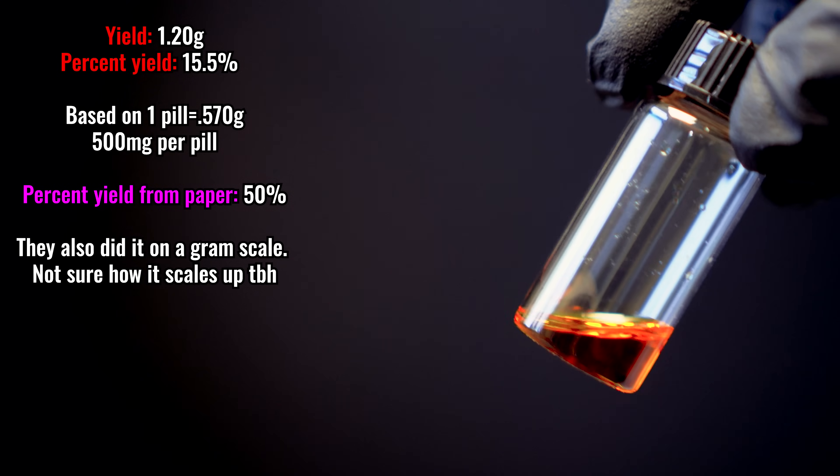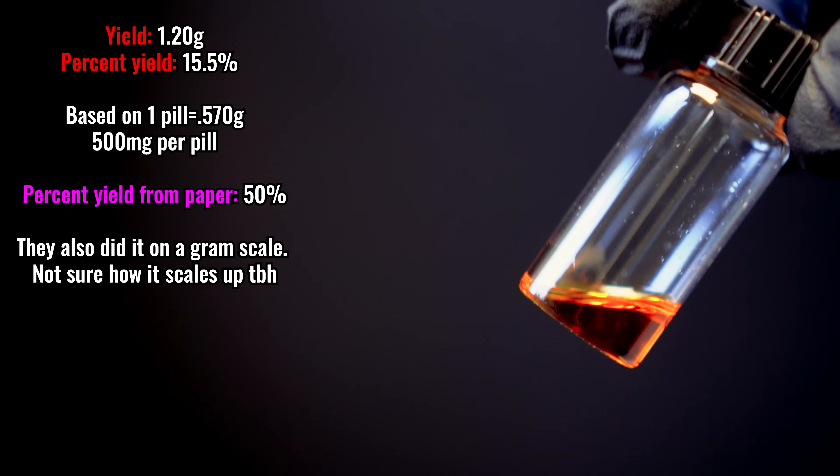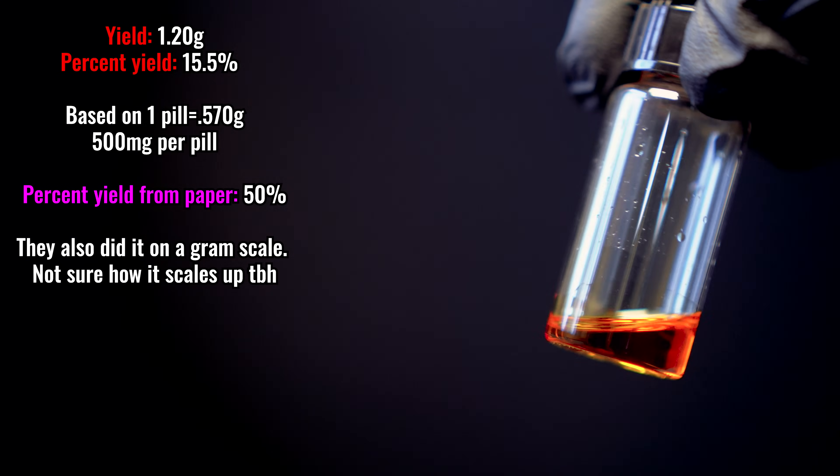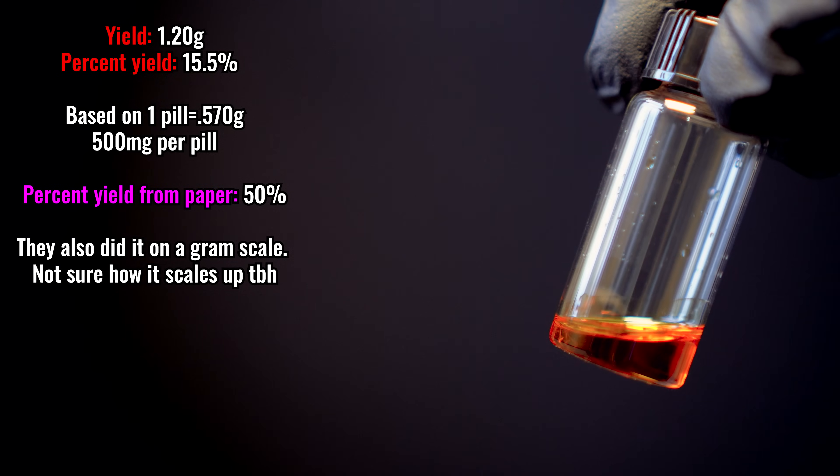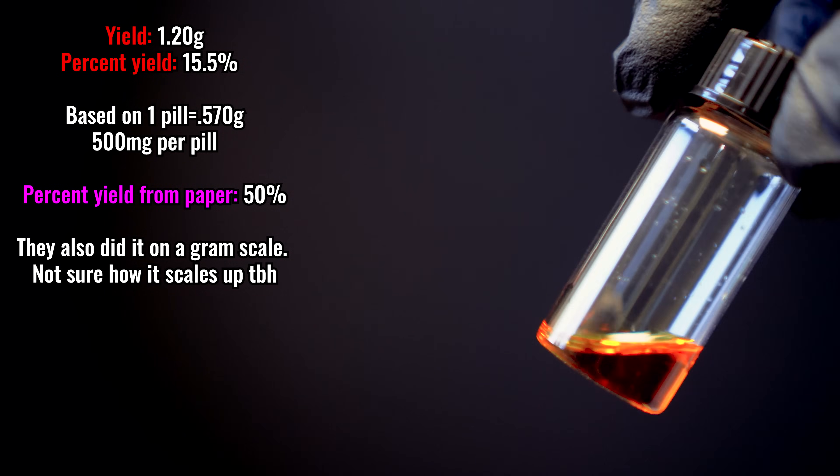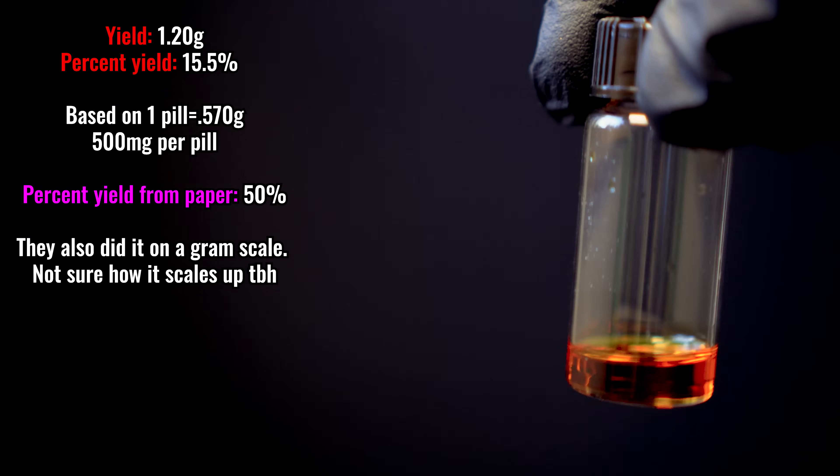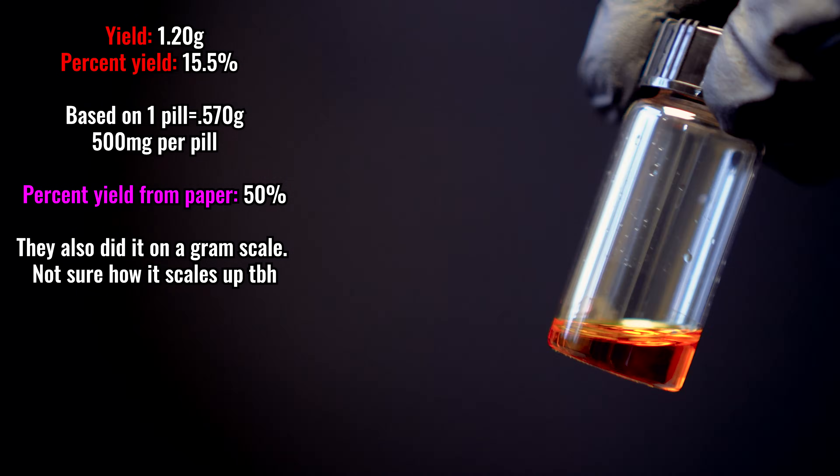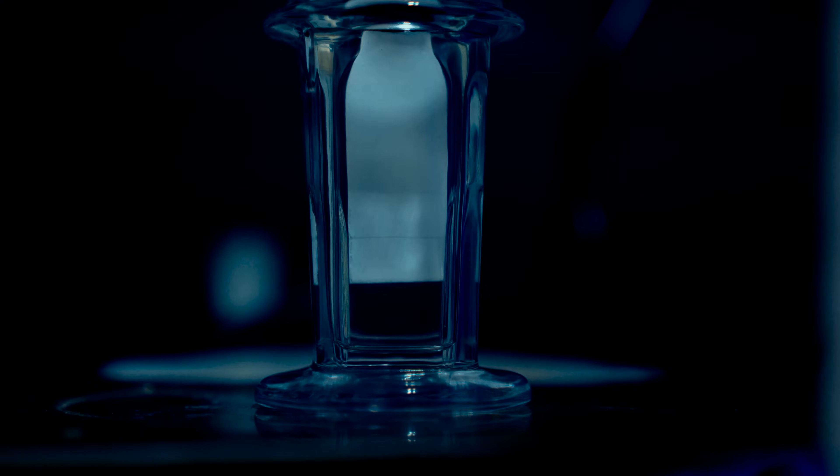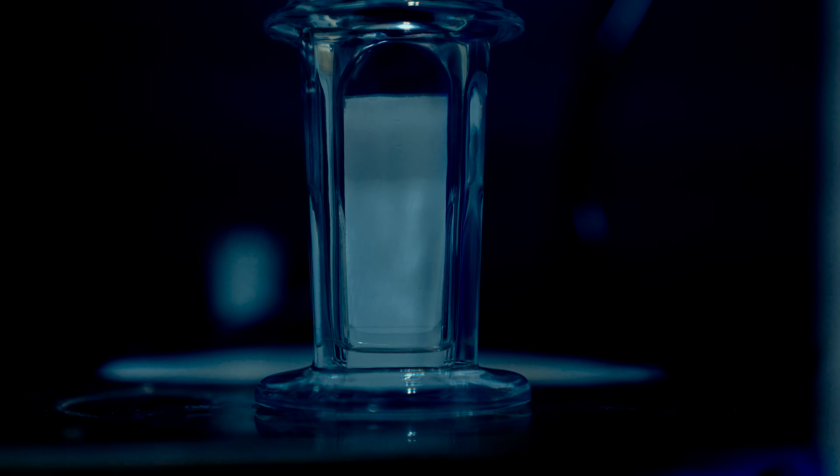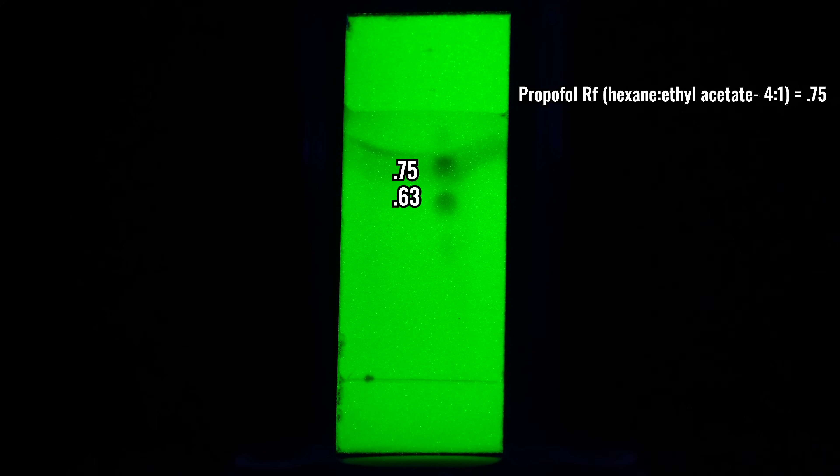Overall we got this nice translucent oil and I'm pretty happy with it. I am genuinely curious as to what the impurity is that makes it orange. I am sending this to Brent over at More Analytical to see what this actually is. This does have a phenol-like smell and I'm pretty hopeful that this is propofol. The yield is 1.20 grams and the percent yield is 15.5%. The percent yield from the paper was 50% but they only did it on a gram scale. I'm not sure if it scales up poorly or if I needed to add more water during the steam distillation. I also decided to do thin layer chromatography as the paper gave their Rf value. Based on the paper the Rf value for propofol is 0.75. This top dot has an Rf value of exactly 0.75.